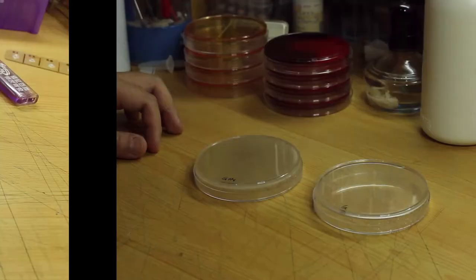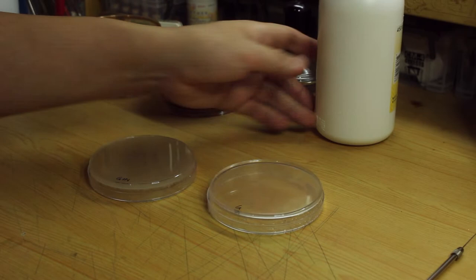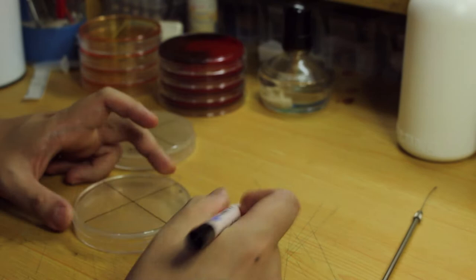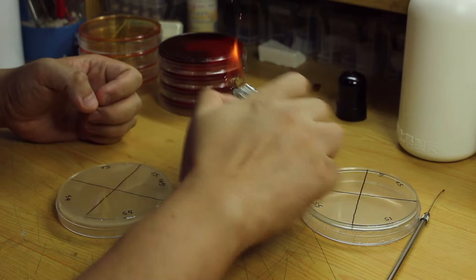The next test is the gelatin hydrolysis test, based on whether the bacteria can hydrolyze gelatin. To do this test, first I prepared two types of improvised gelatin agar: one only gelatin and one with additional agar rolls. I'll make a video about making this agar later as a supplement video.